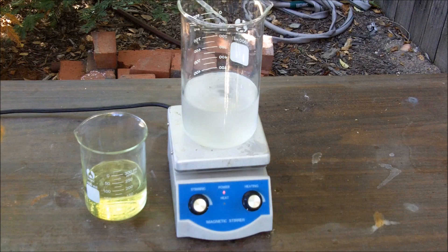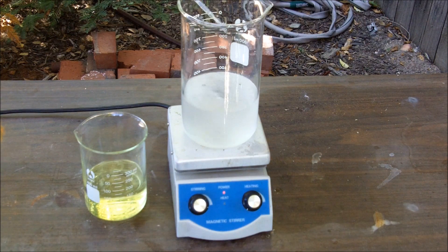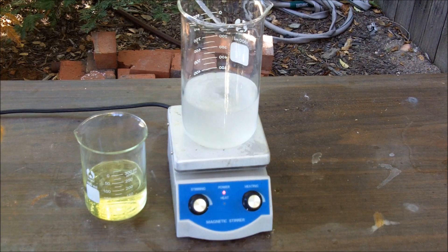All right, well I am going to slowly continue to add bleach for the next couple of minutes, and I will let you know when I am done.